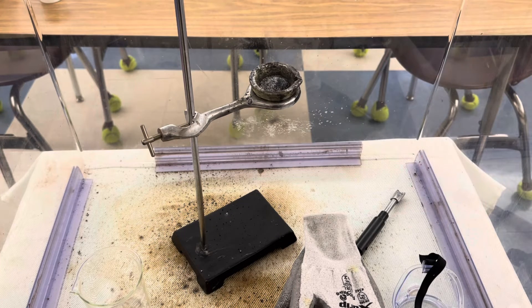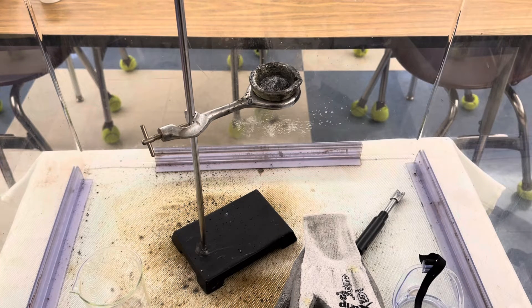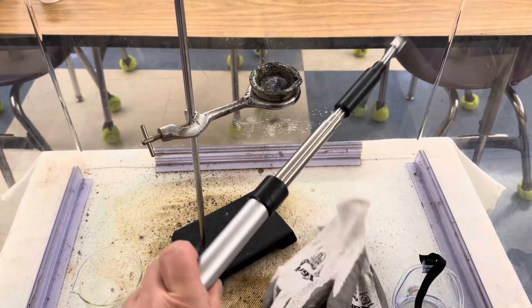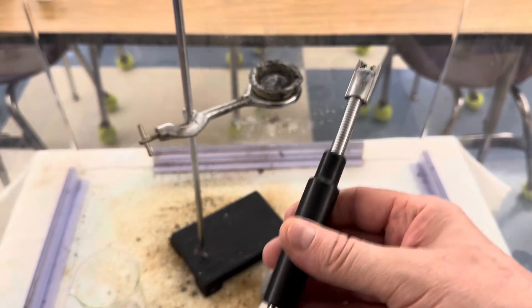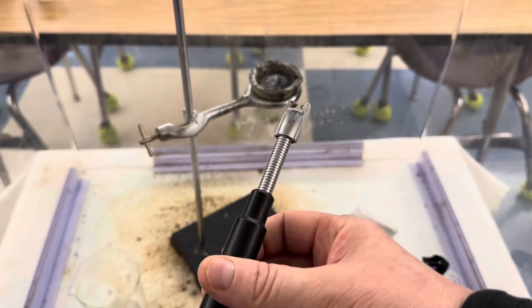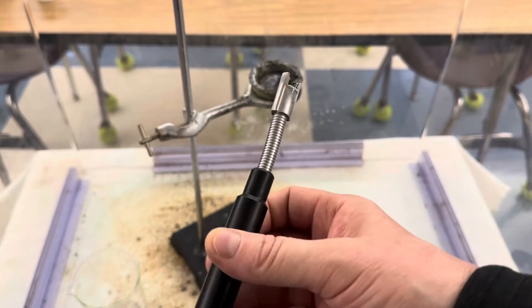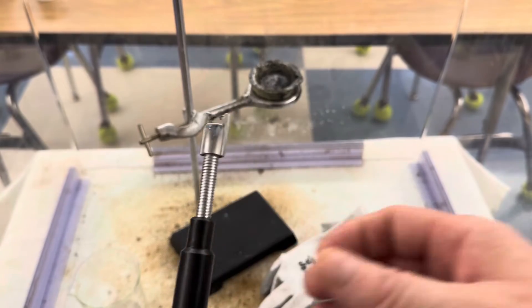The activation energy that we're going to use for this reaction will come from an extendable plasma wand that we can extend so we can be at a safe distance from the reaction.